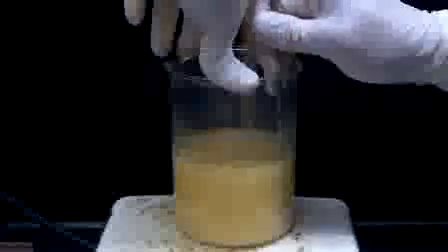Anyway, once it's all added to the beaker, I use a metal spatula to break up the hard cake at the bottom. In theory, our methylamine hydrochloride should be soluble in the methanol, but the ammonium chloride isn't. By washing it with the methanol, we should be able to dissolve all of our methylamine hydrochloride into solution and leave behind ammonium chloride, which can be filtered off. It takes several minutes of mixing, but we really want to make sure that there's no chunks left behind.